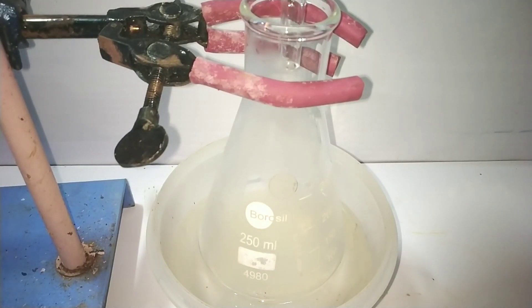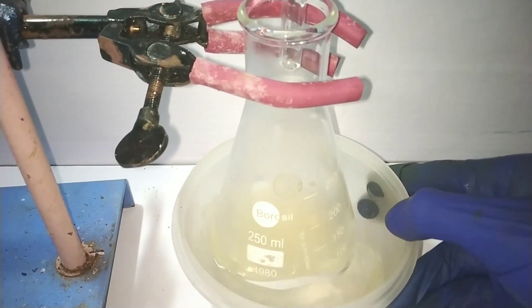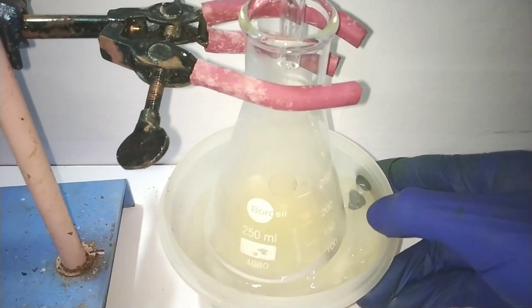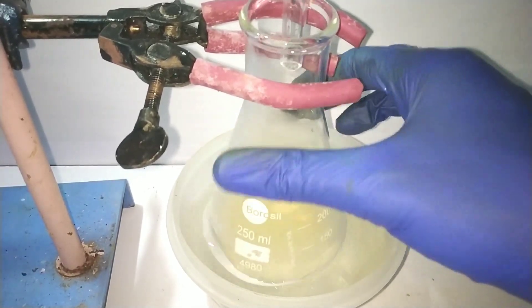Now slowly open the separatory funnel so that the acid alcohol mixture falls down dropwise into the sodium nitrite solution. Swirl the flask continuously. The complete addition took around 20 minutes.